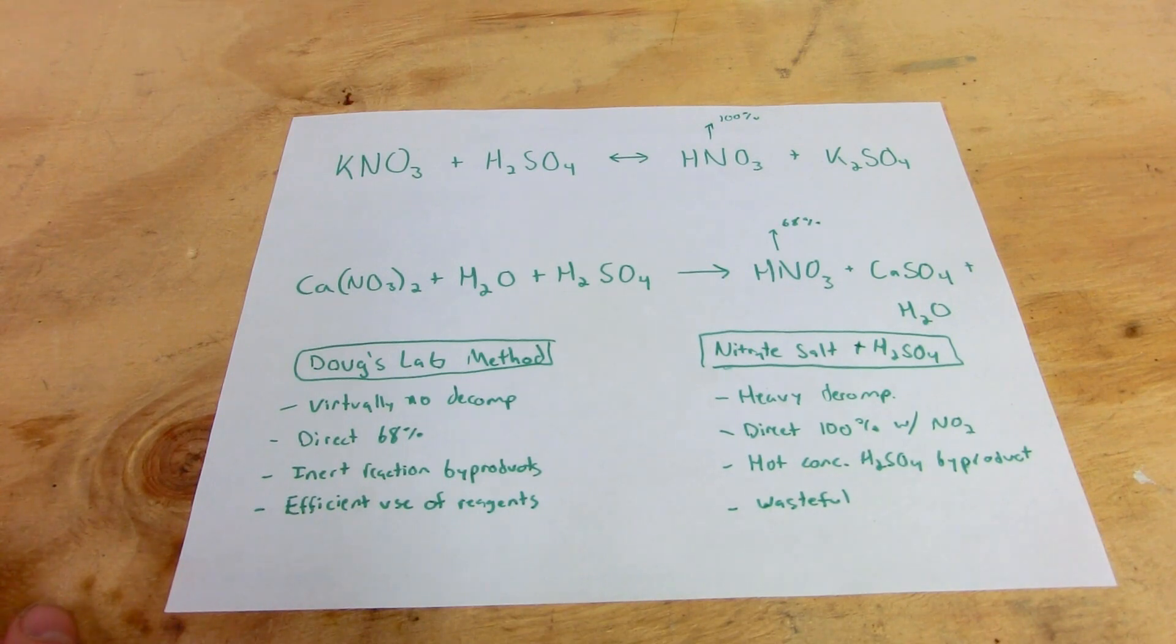Hi everybody, welcome to another Doug's Lab video. In this video, I'm going to show you how to make nitric acid at 68% concentration using a nitrate salt and sulfuric acid.